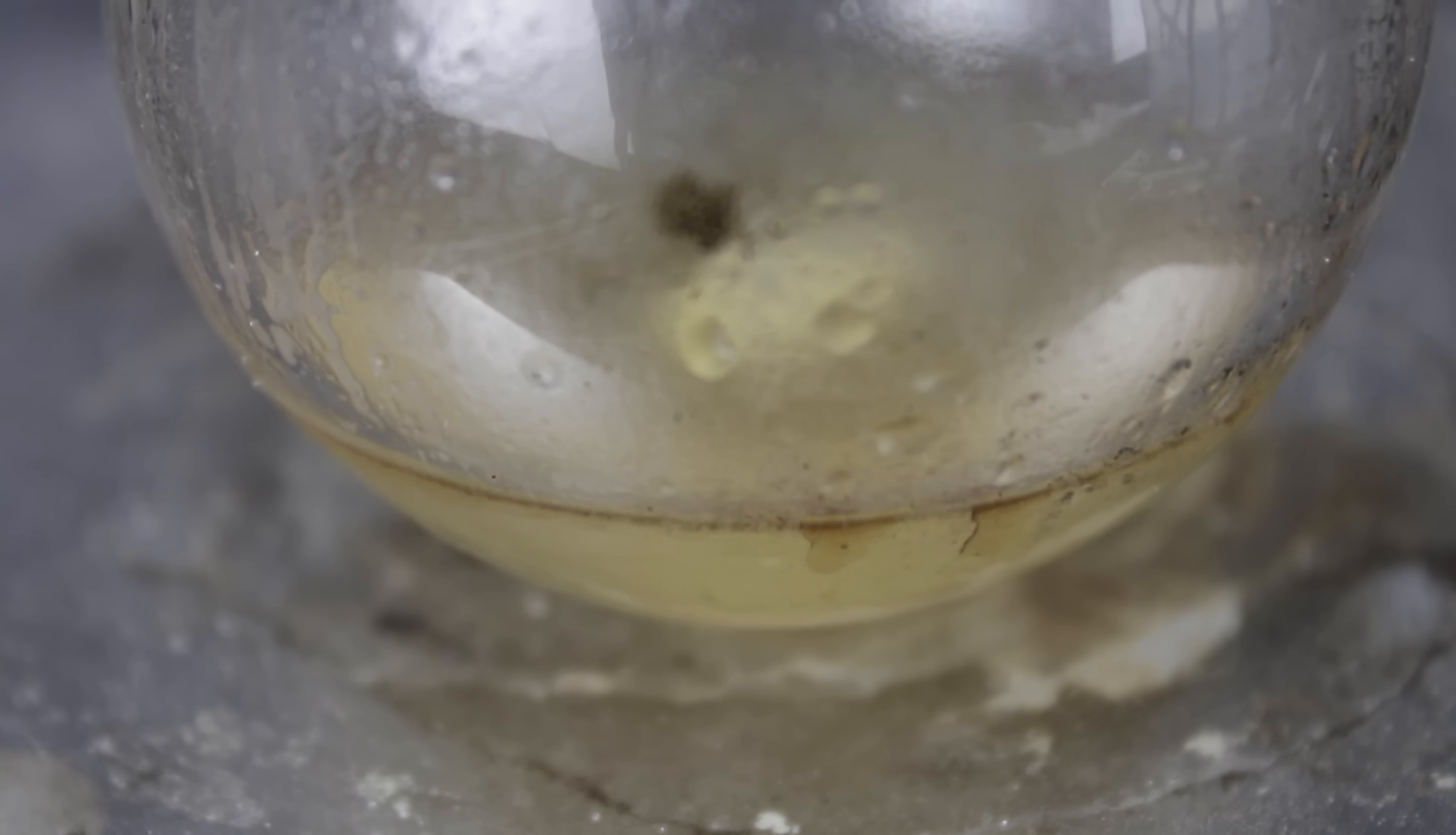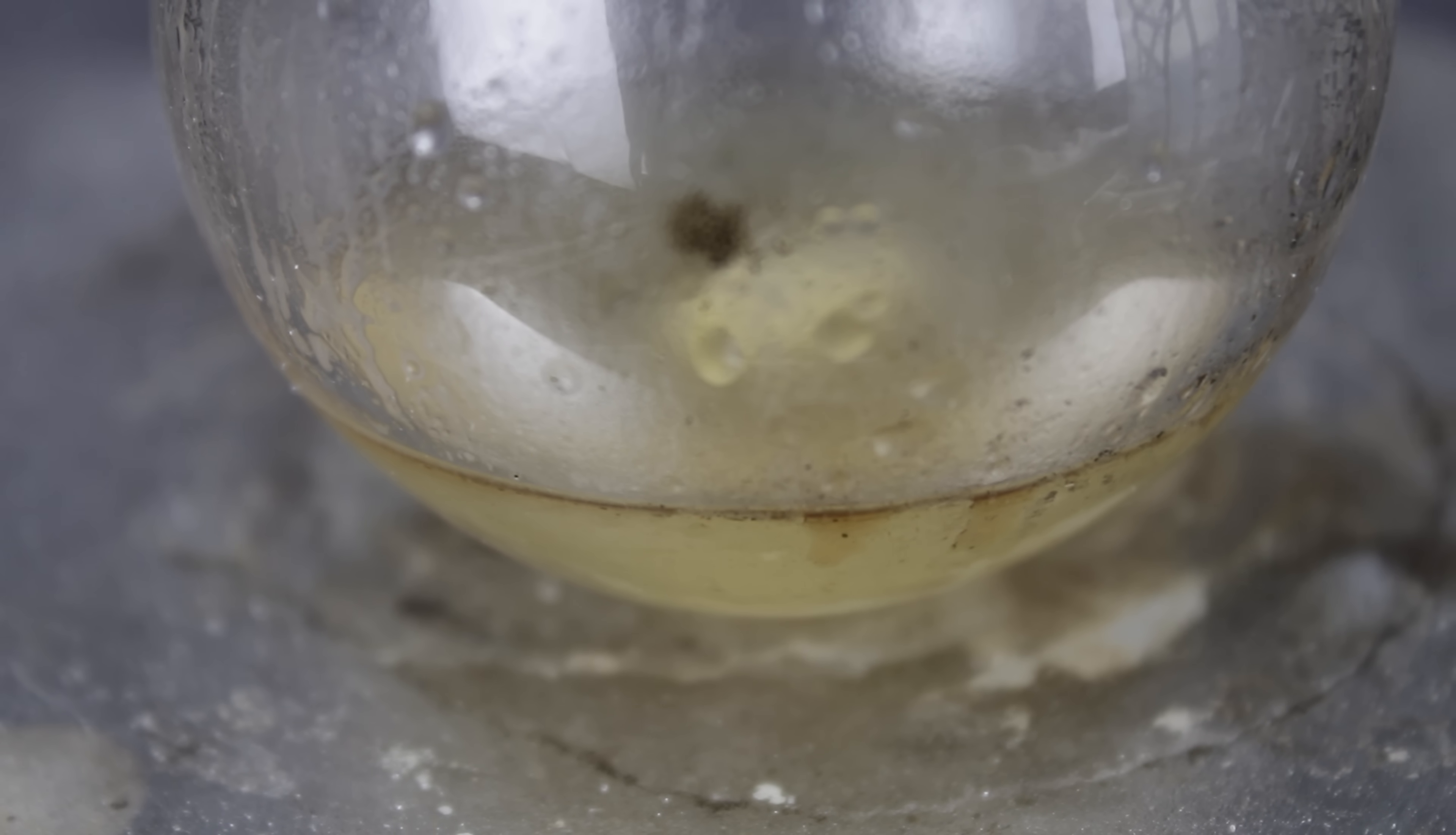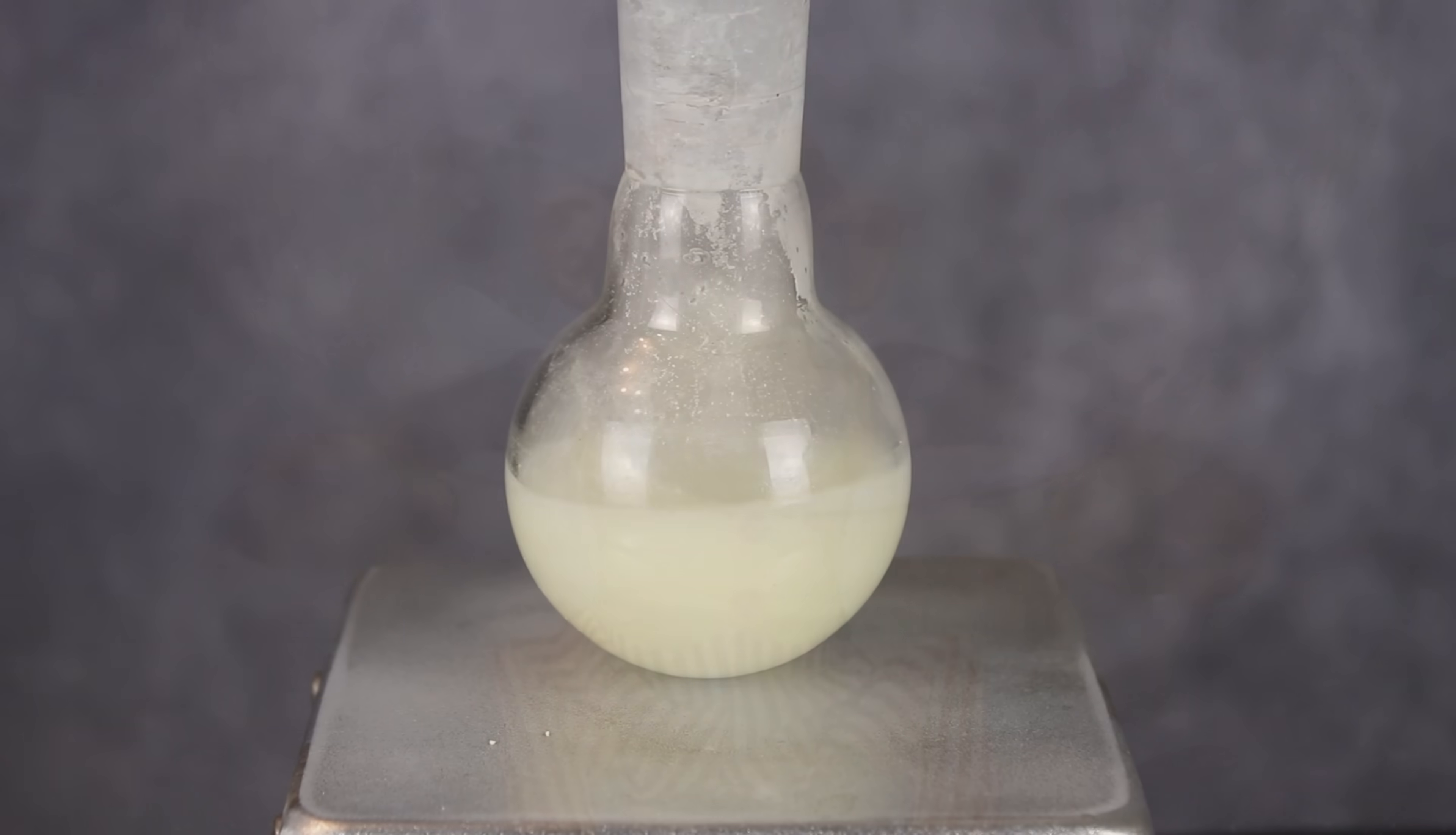Again, boiling water in a pH imbalanced solution? Not the best for esters. I honestly forget what my logic was behind all this, probably because I didn't have any. Who knows where my brain was that day. Either way, you now know what didn't work, which means it's finally time for me to show you what did work.